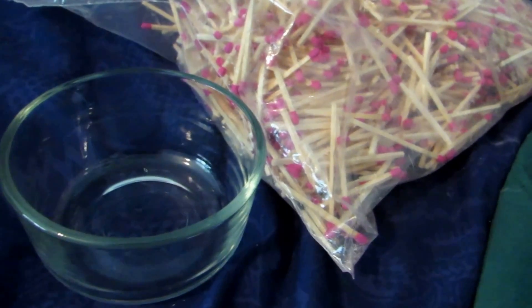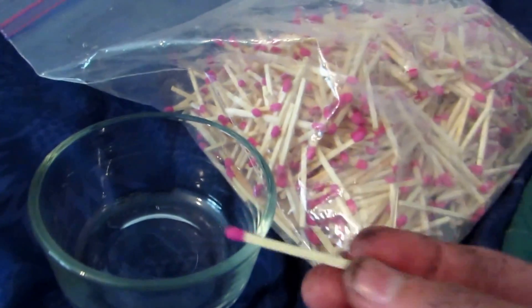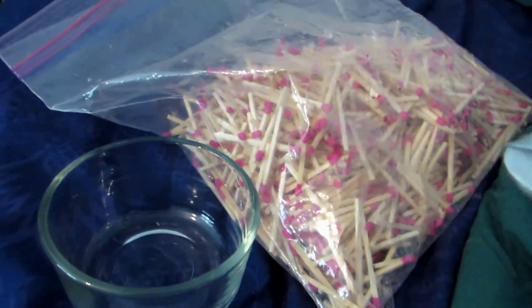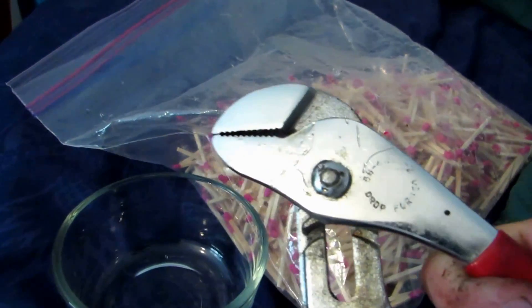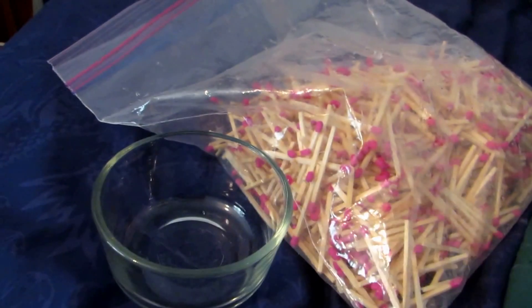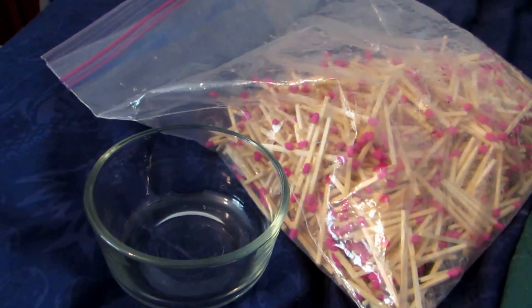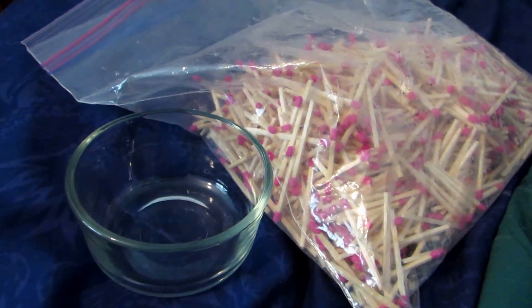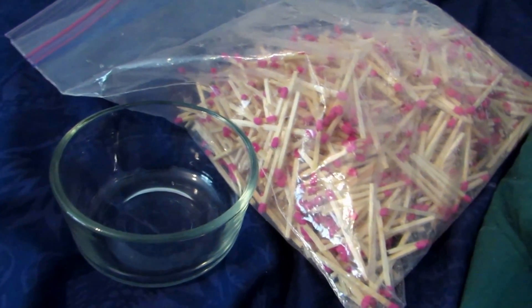This is a lengthy process, but mainly just at the beginning. What we need to do is take our matches and use some pliers like these to crush the head of the match and get all the pink powder out. It doesn't matter what type of matches you use as long as they're not strike-anywhere matches — those have a little white tip at the end and will not work for this procedure.